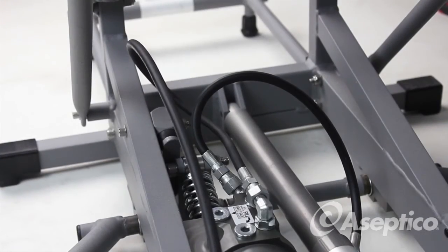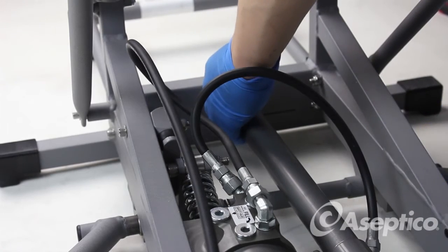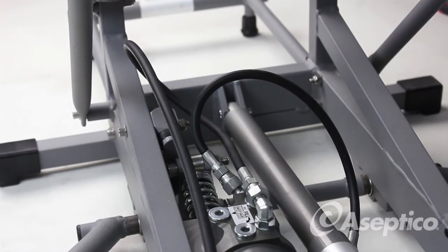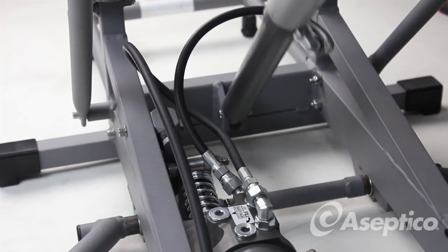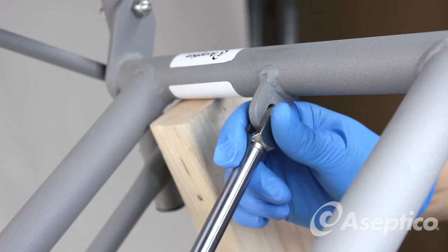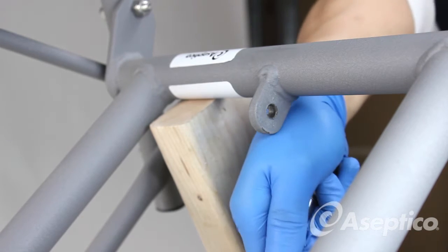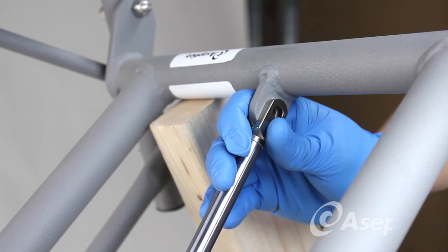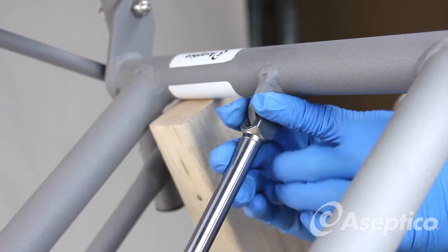Place the main cylinder into its slot and use the clevis pin to hold it in place. Ensure that the hose is in the correct configuration. Install the second clevis pin. If the hoses do not align, release the pressure and push the rod inward, or pump the cylinder to its hole. Then, using the smaller clevis pin, place it in the seated position.